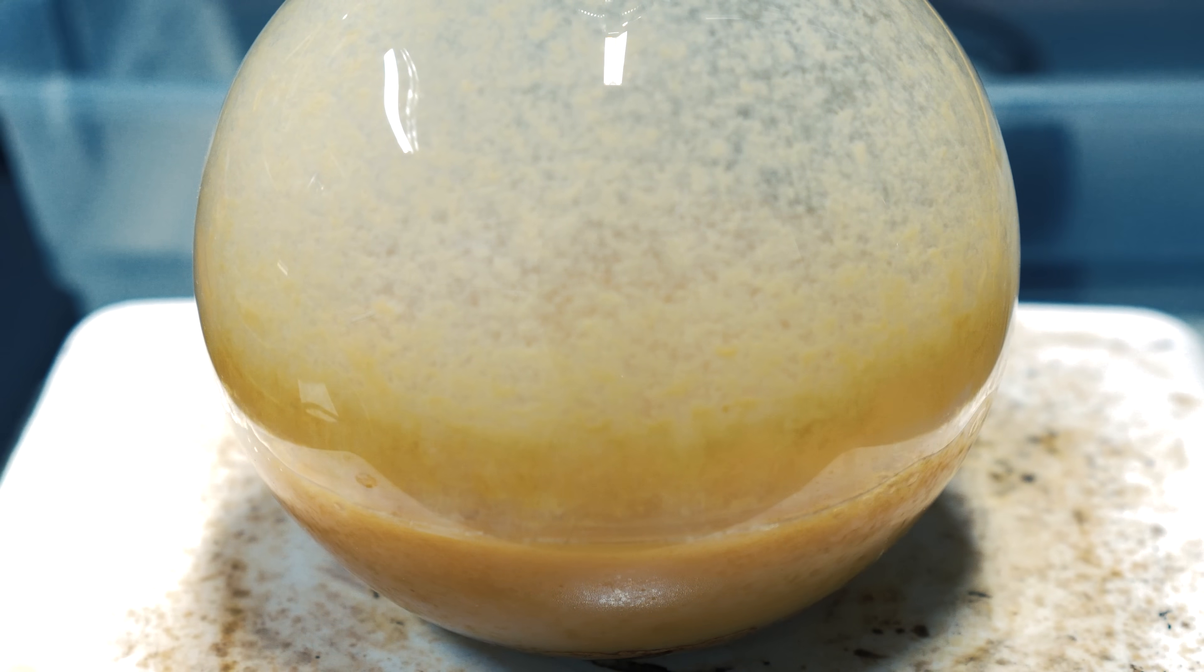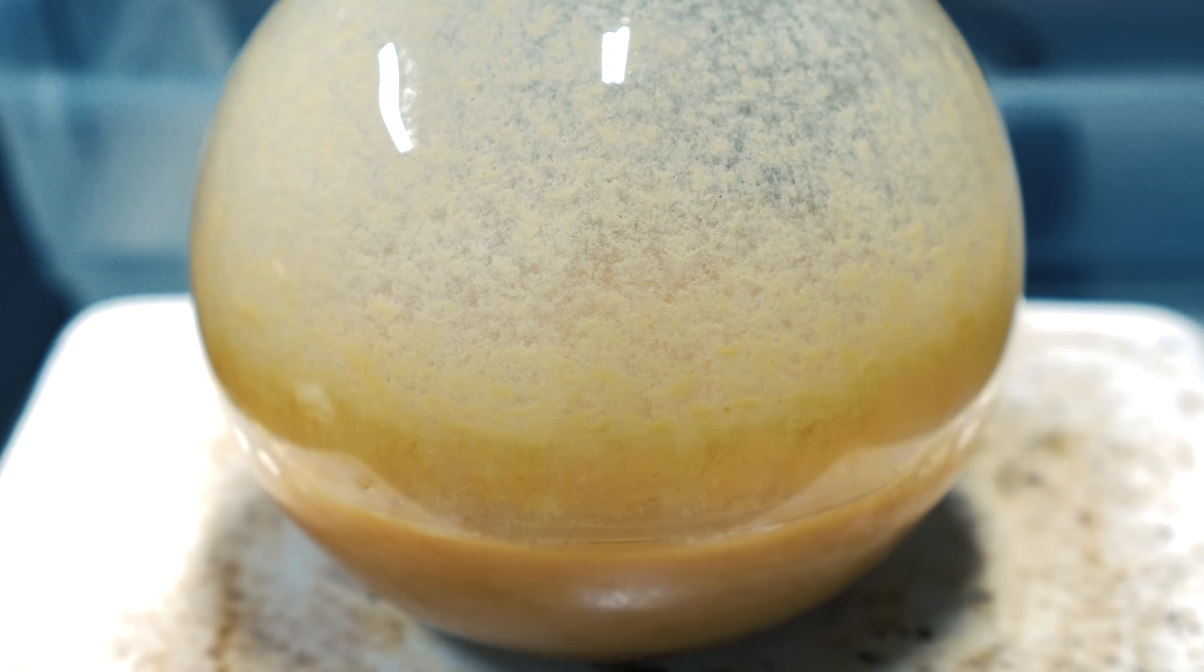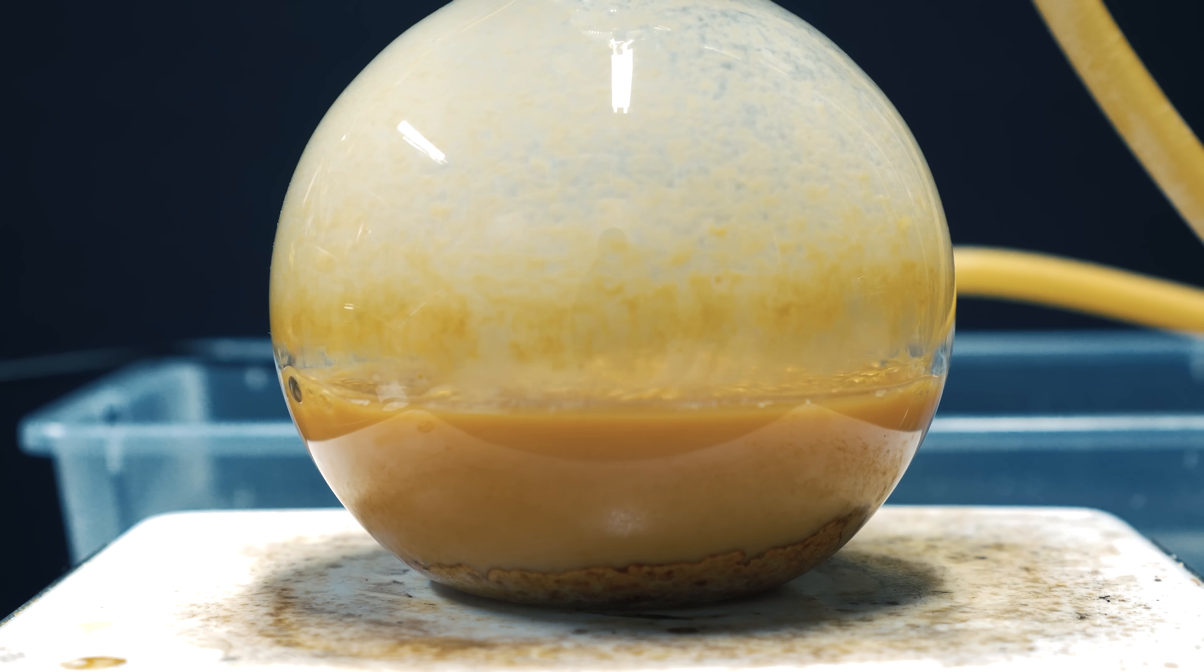Near the end of the reaction, you can see that the solution mixture became very opaque and orange. We also have a ton of tin that didn't react, and is kind of stuck on the side of the flask. This worried me a little bit since it didn't react, but I decided to go on.